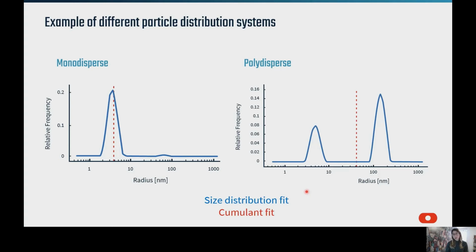For a polydispersed system, shown on the right-hand side of the screen, there are two different peaks in this example, which correspond to two different particle species, each with their own radii. However, the cumulant fit, that dashed line, falls within those two peaks. And again, this is because the cumulant fit assumes an average radius from all the particles in solution. So in the case of a polydispersed system, you would actually want to use the size distribution model to acquire particle sizing and dispersity information.